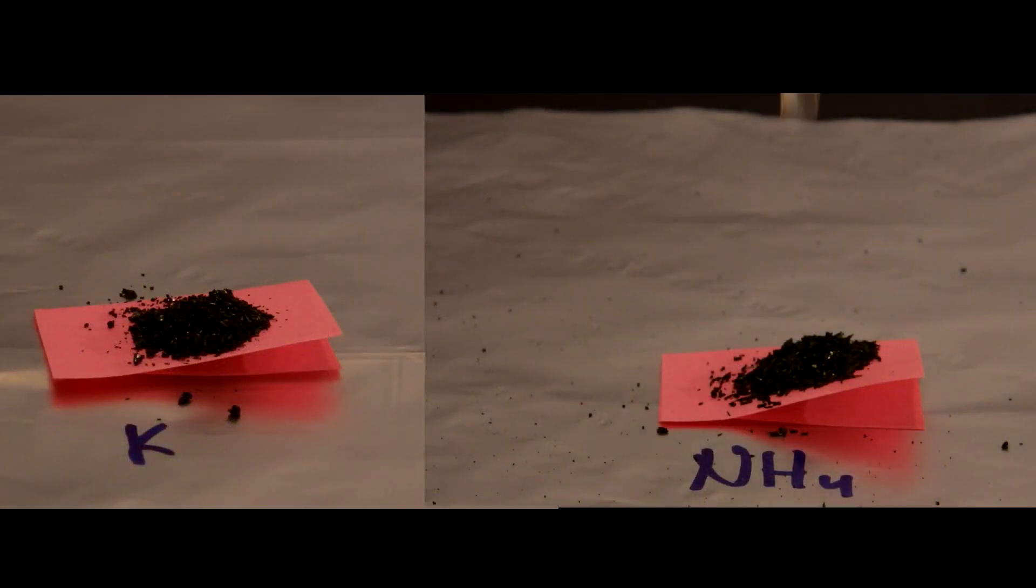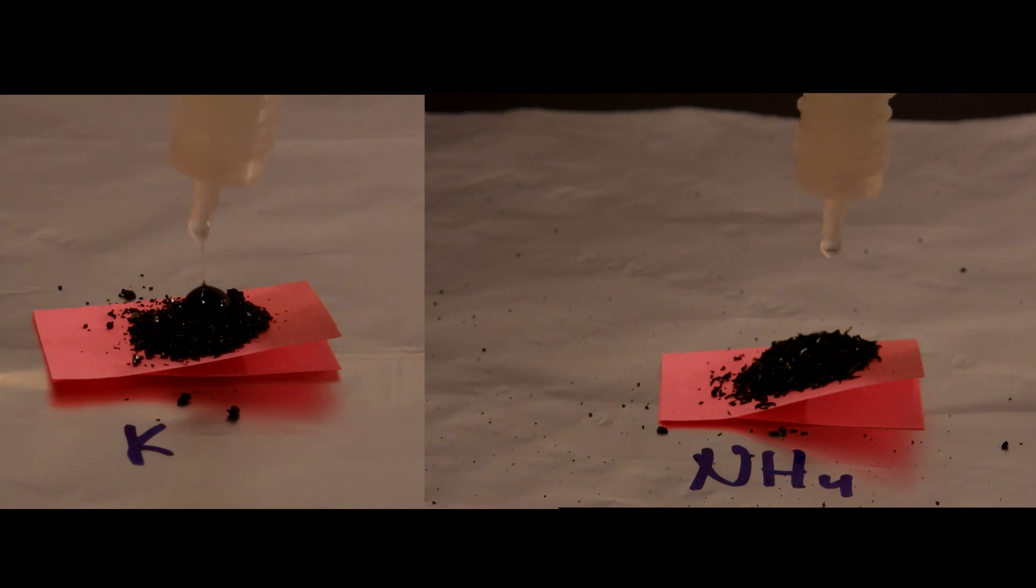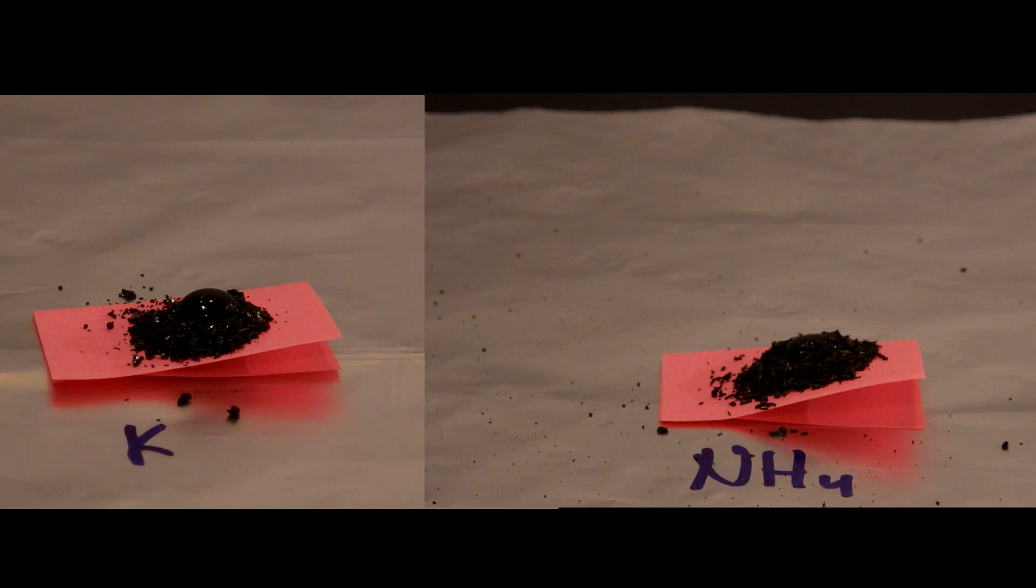You are probably thinking this is not ammonium permanganate, so I will show the difference between ammonium and potassium permanganates. First start with standard reaction with glycerol. You have seen this with potassium permanganate, but I'll make it so you can compare.